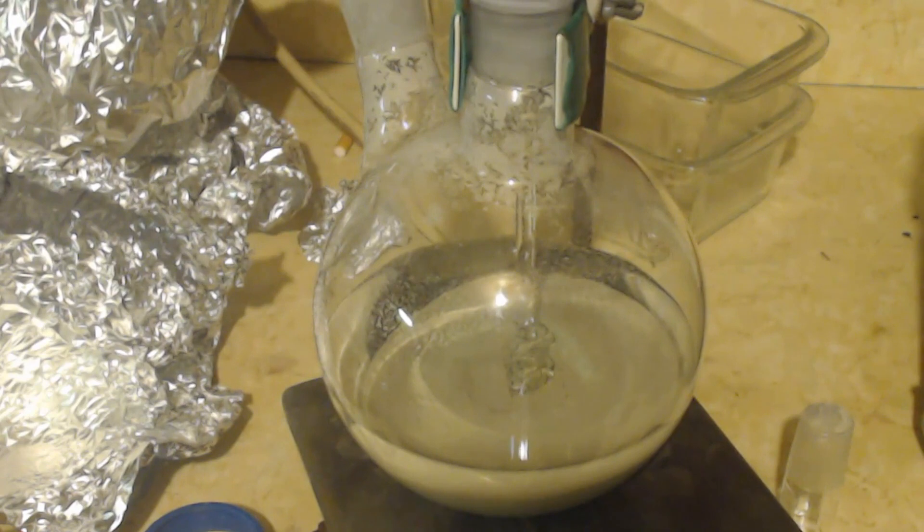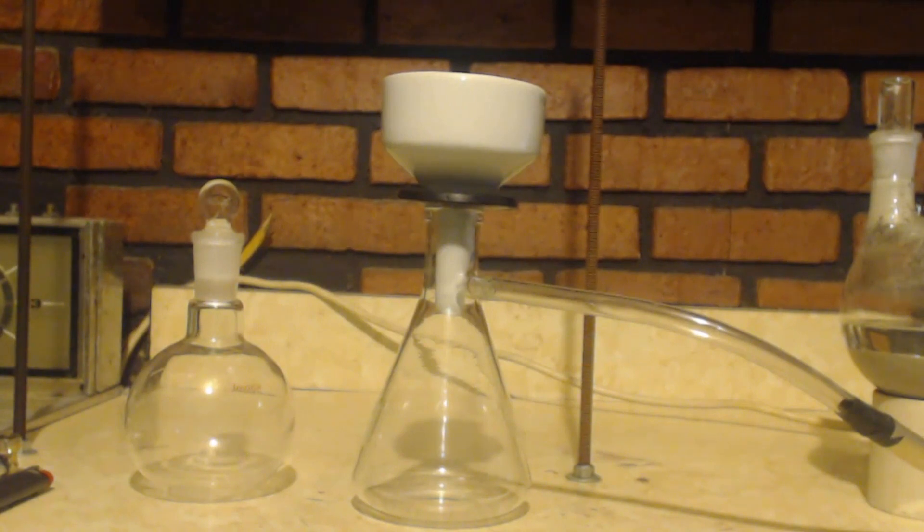I mean, this powder inside there, that is totally gray now. There's not one speck of yellow in there. It couldn't sit to finish this yesterday, so it sat all day yesterday and a little bit today. No stirring.